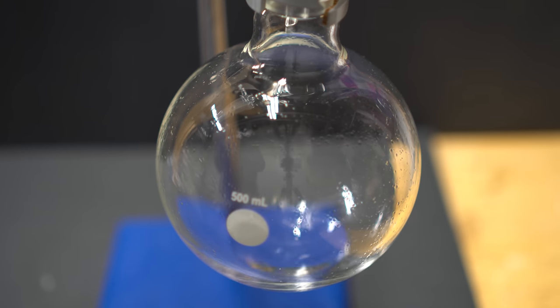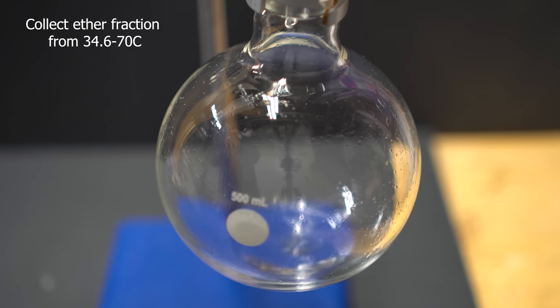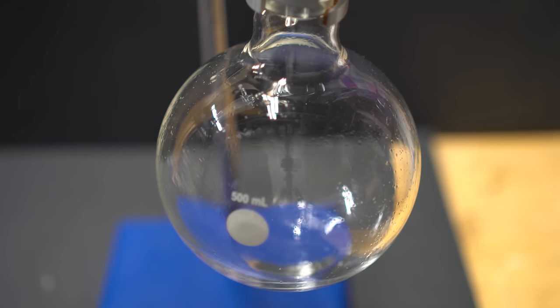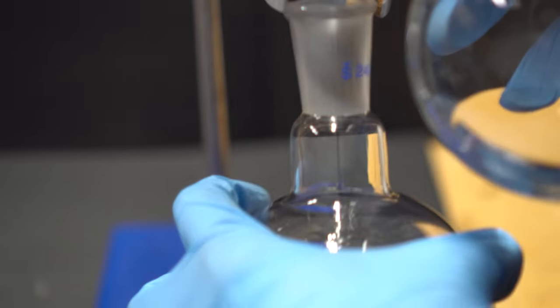Here you can see some ether that came over and it is below its boiling point so it might be confusing when you first see it. Ether boils at a temperature of about 35 degrees Celsius and you're going to collect everything up until about 70 degrees Celsius.